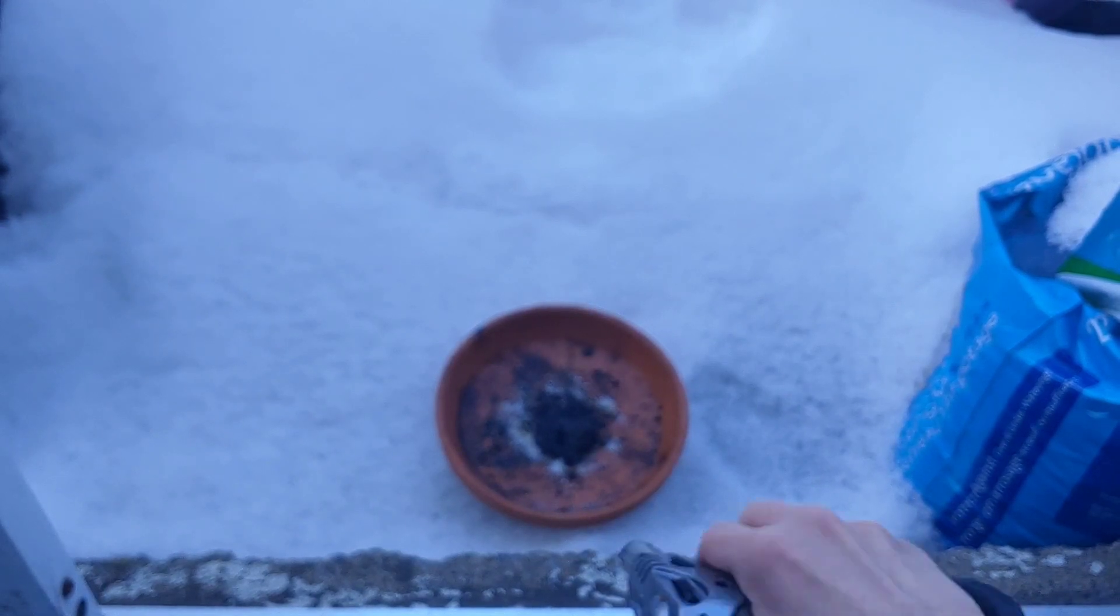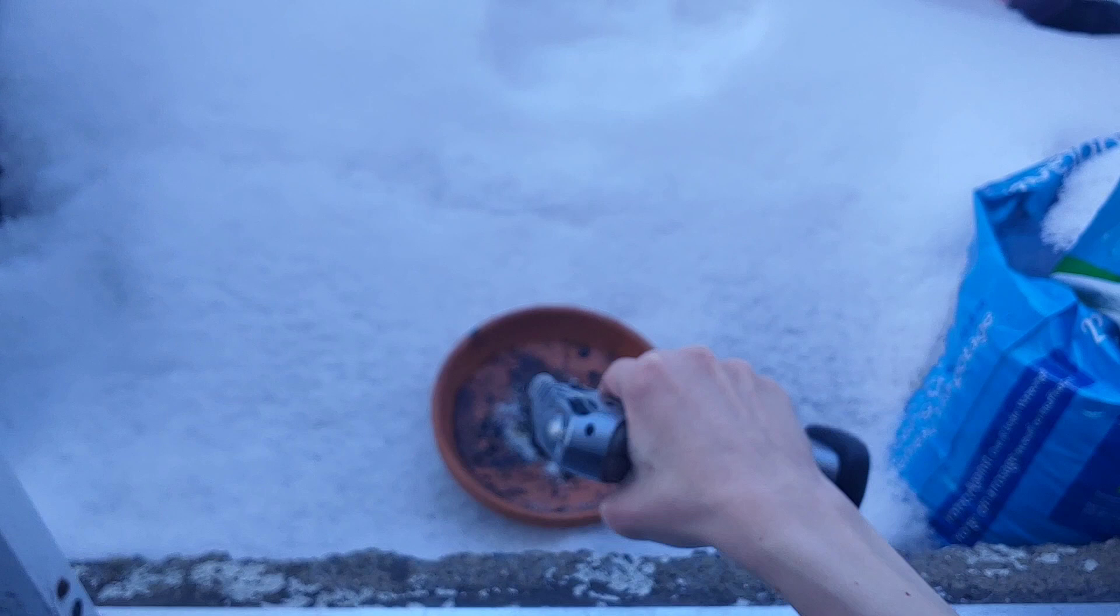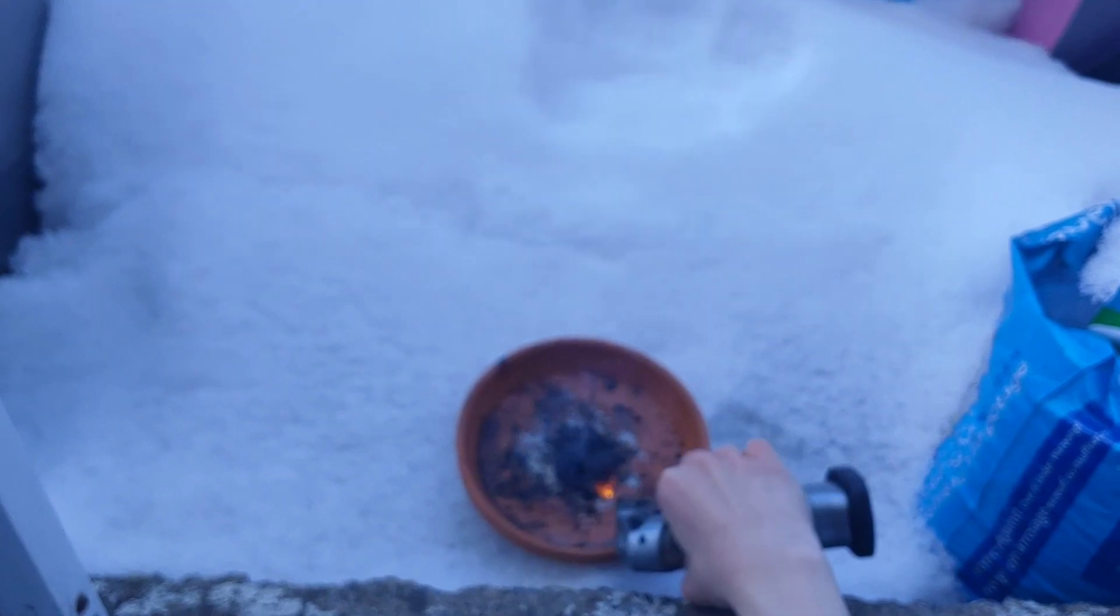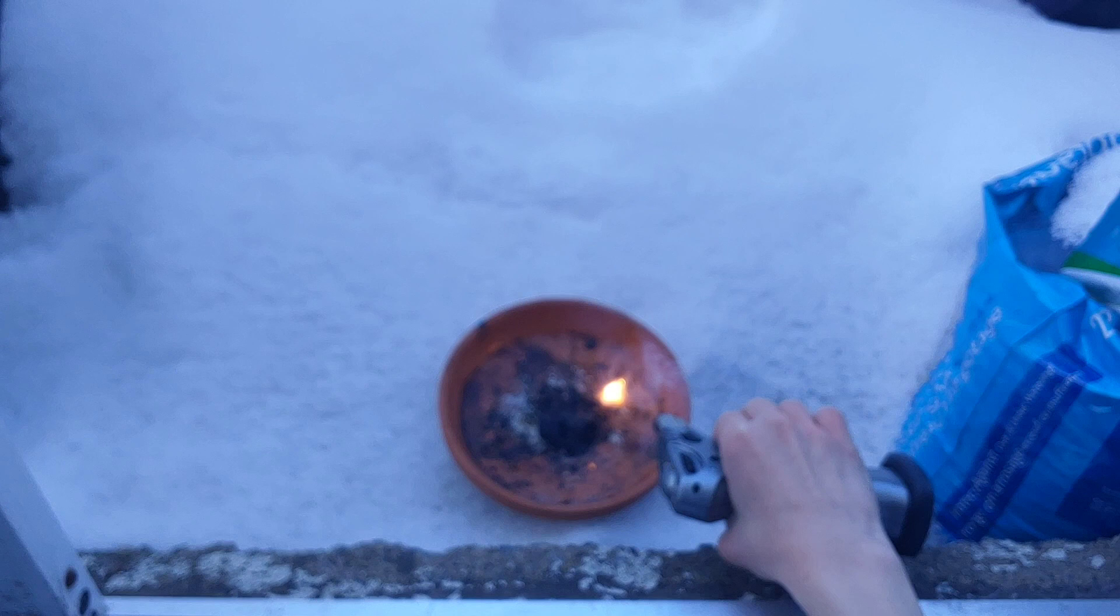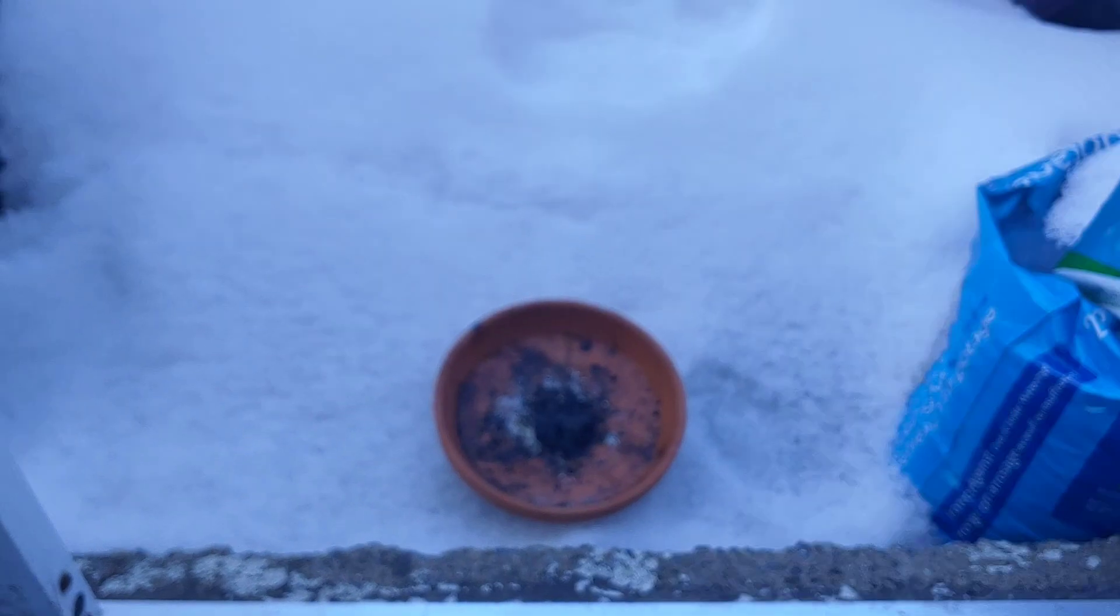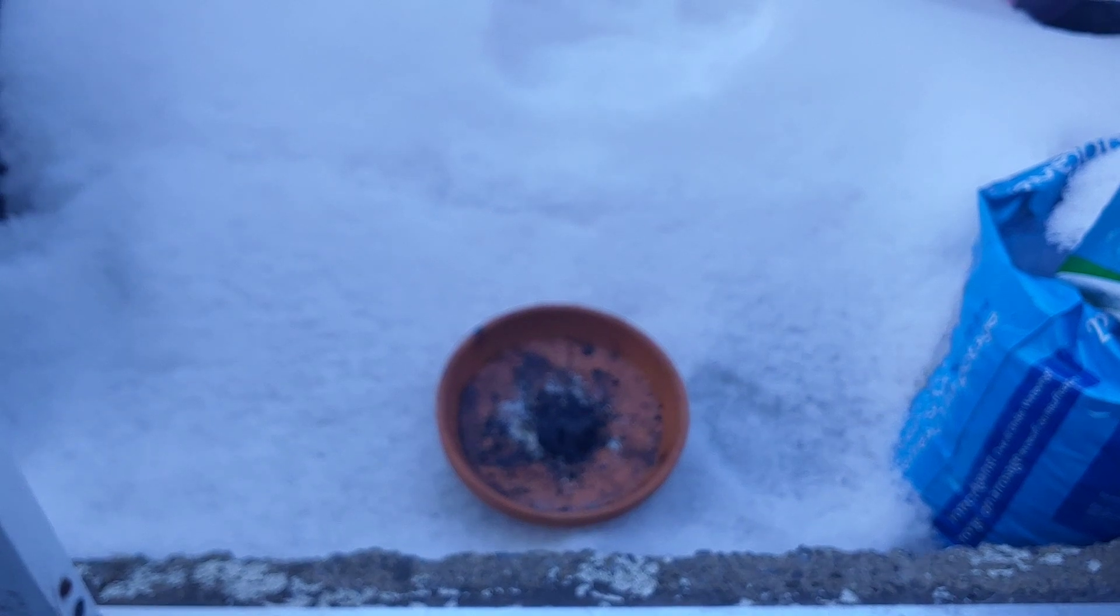Okay, so that didn't really burn too well. Oh, well, that's really too bad. I think I added a little bit too much sugar. Well, that was the attempt.